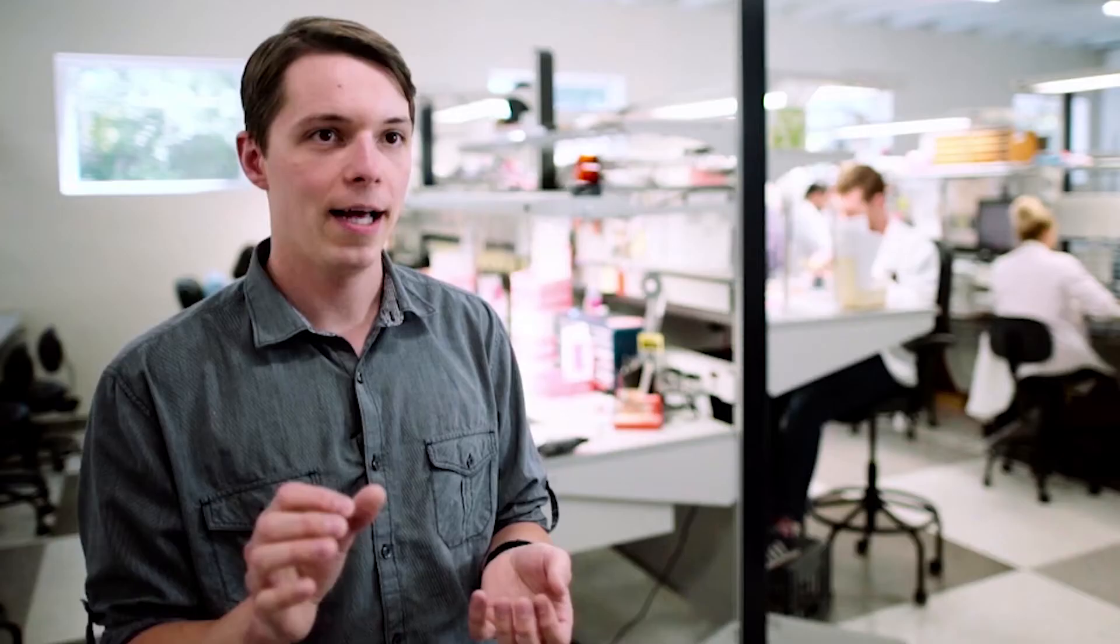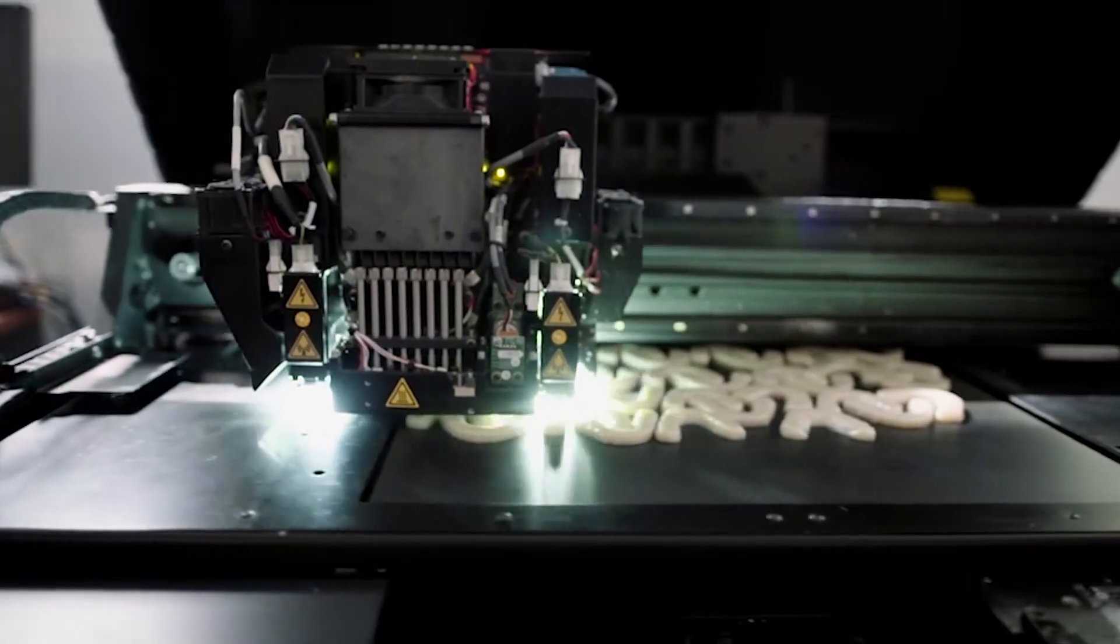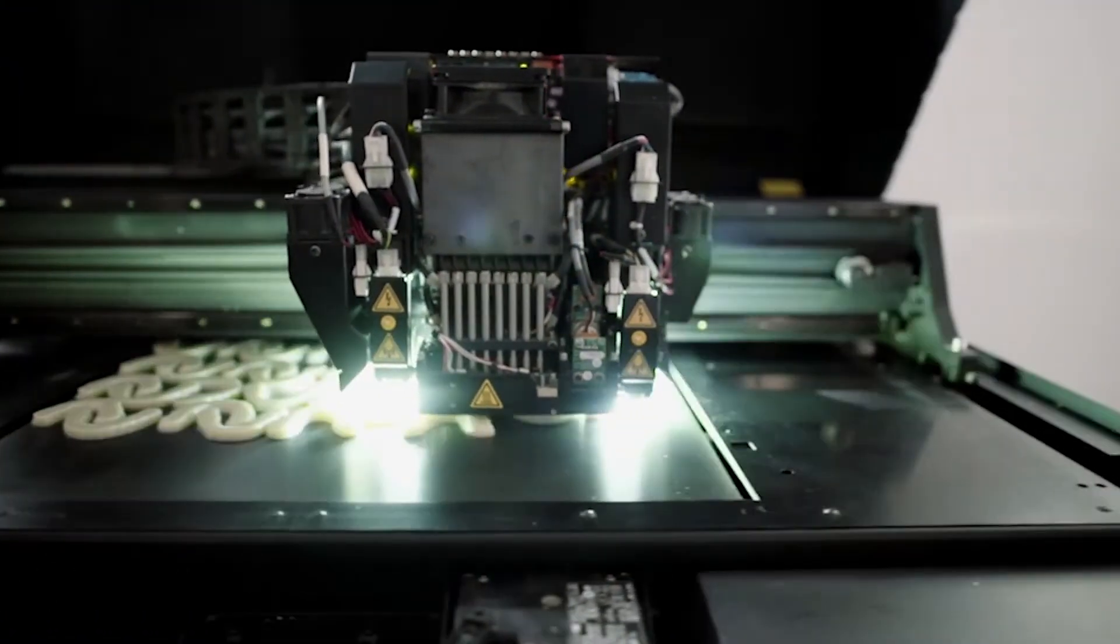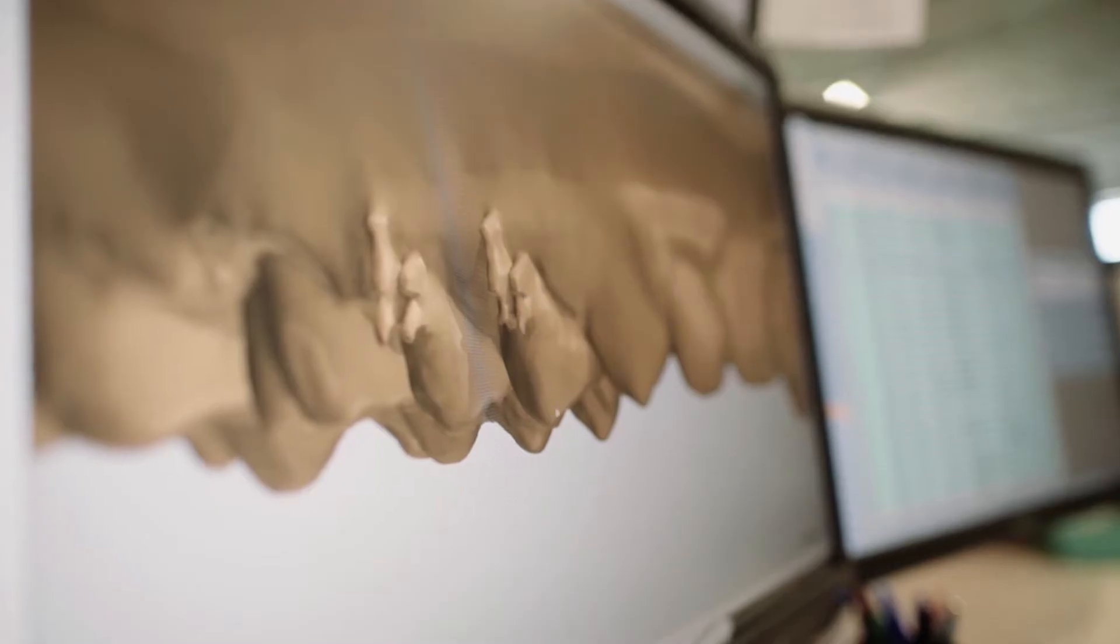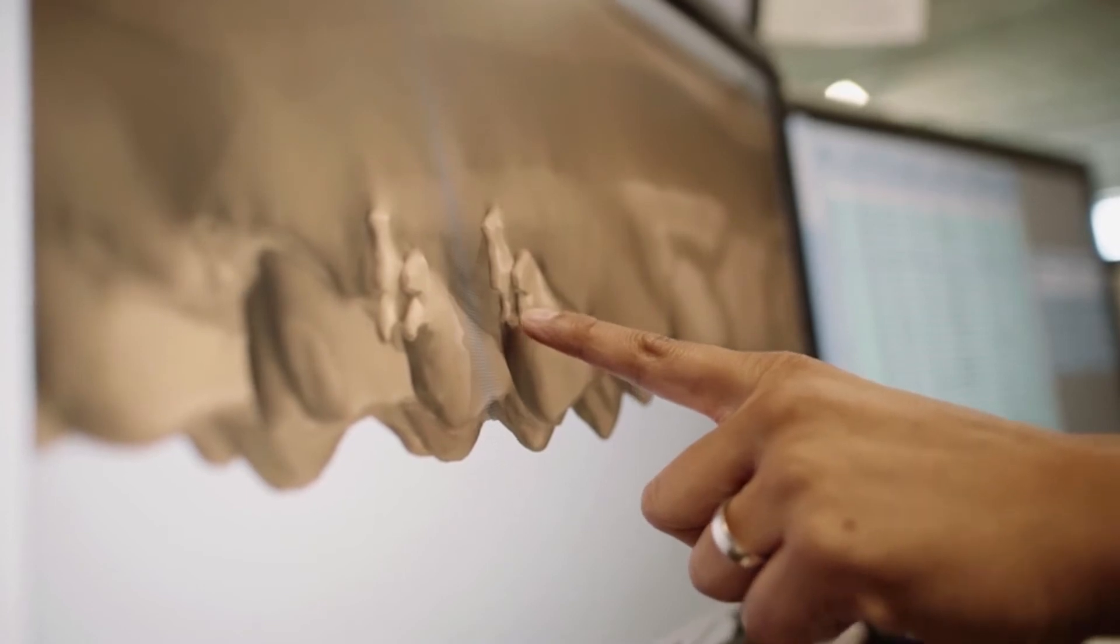You can see every little detail and we print everything at the best quality we can get. Within the CAD programs, we can extract the brackets so that they do not need to take the brackets off of the patient any longer. We can do that within the CAD system and we can do it very accurately.